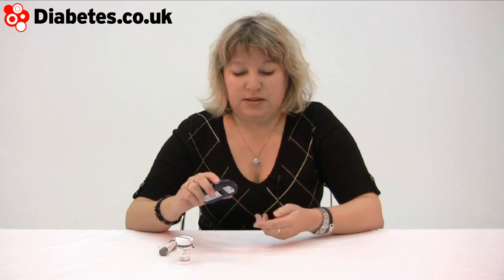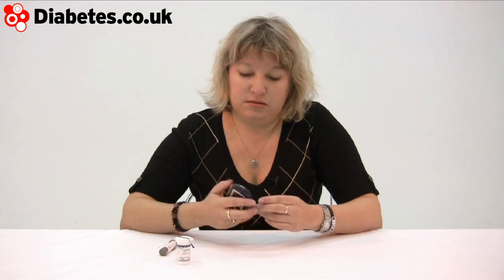The last little thing that's quite entertaining about this model is that slide there pops out the sensor. So if you don't want to handle the sensor, or you've got dexterity issues, that's quite a nice little extra factor on that machine.